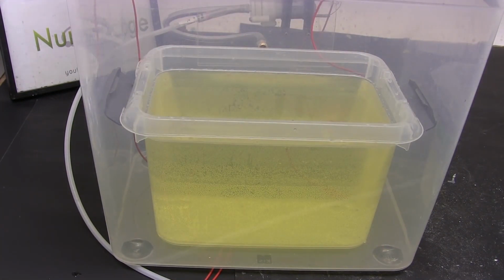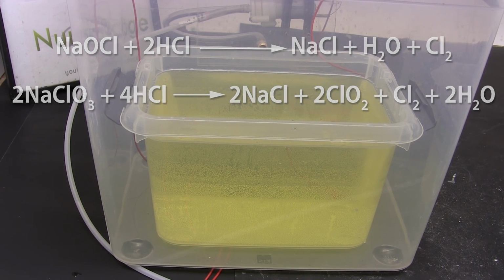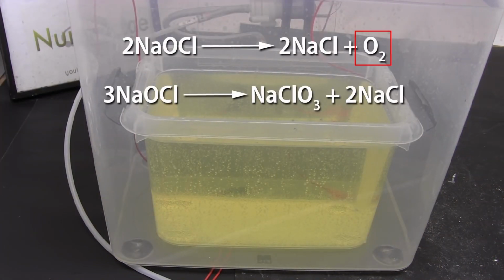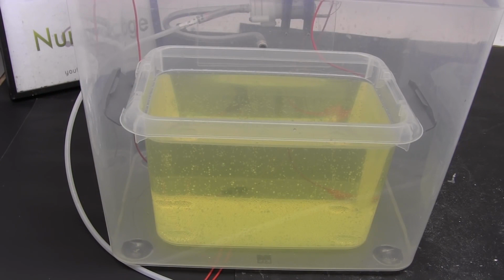What the gases consist of is small amounts of toxic chlorine from unreacted bleach and chlorine dioxide. This comes from the reaction of sodium chlorate with hydrochloric acid. Now, you're probably wondering where that sodium chlorate came from. Well, one decay pathway is the creation of oxygen, but another pathway is the creation of sodium chlorate. Decayed bleach contains small amounts of it that is now reacting with the hydrochloric acid. Anyway, I left this going overnight to remove as much of the chlorine and chlorine dioxide as possible.